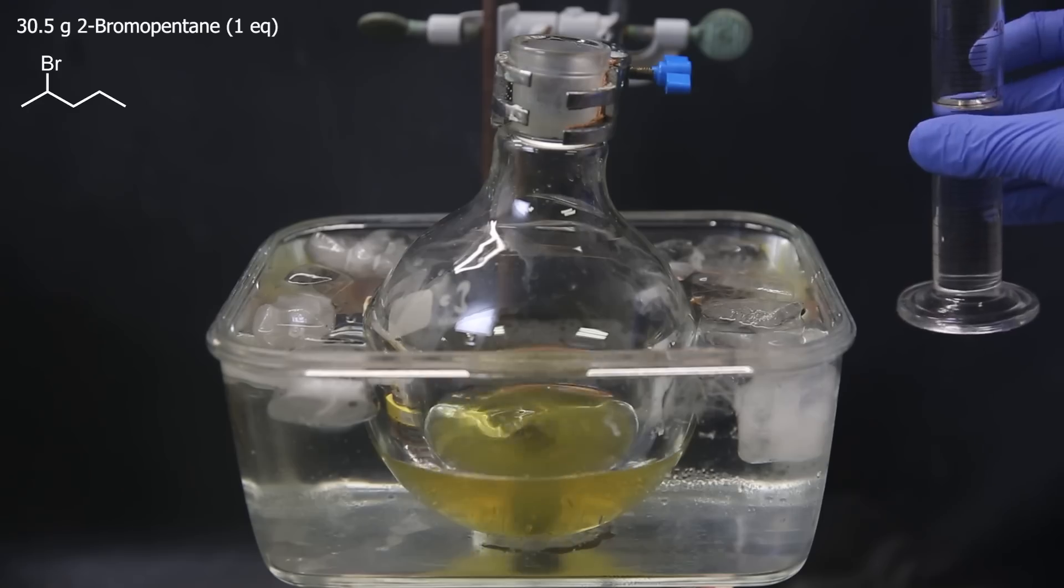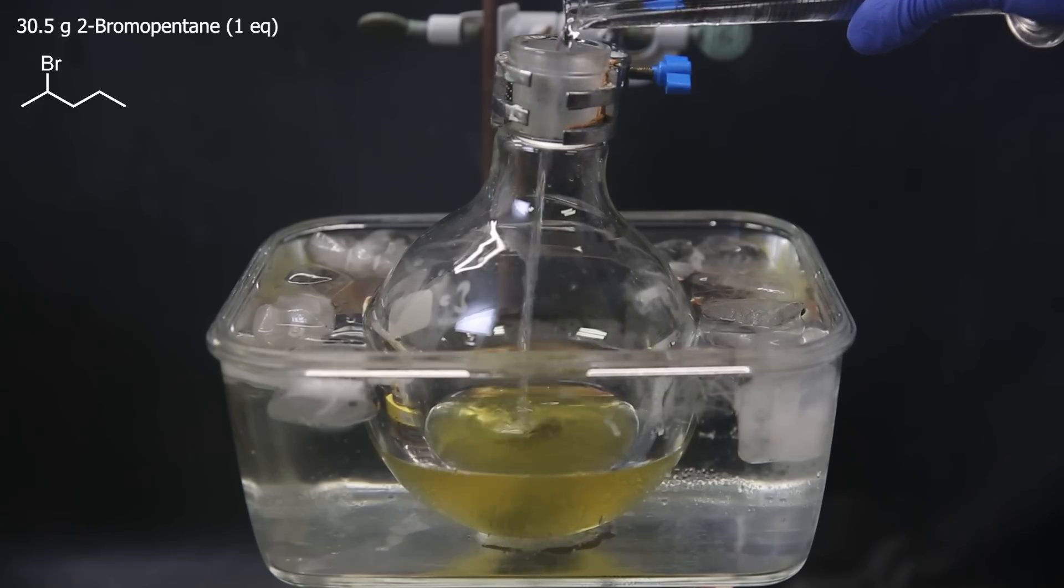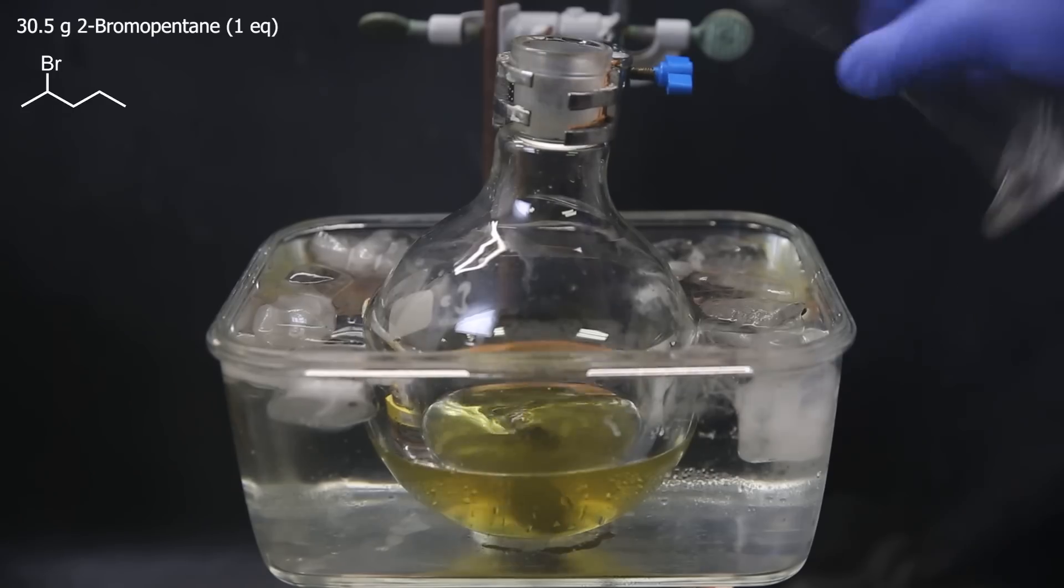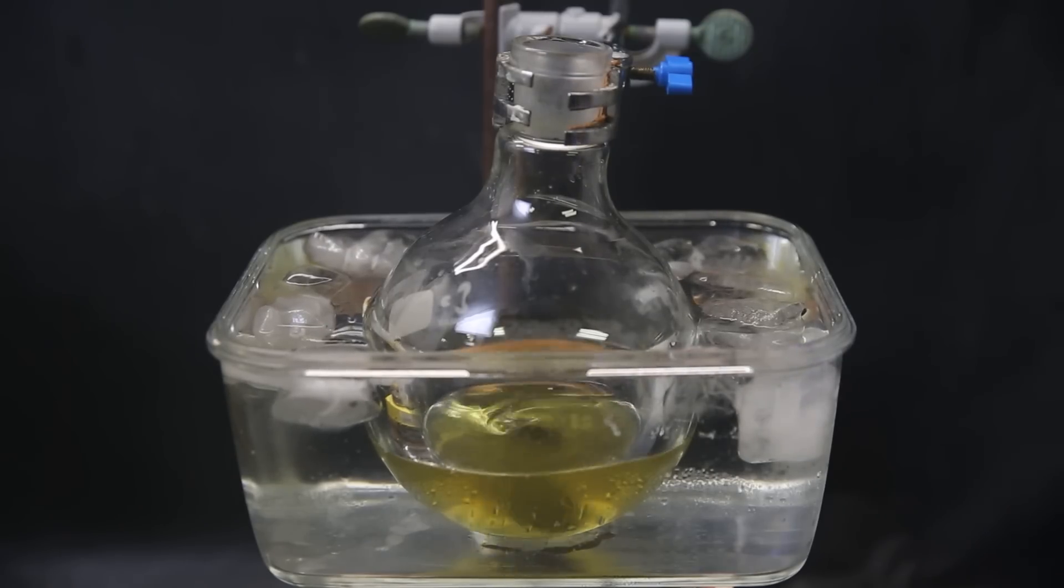As a second reactant, I add in 30.5 grams of the 2-bromopentane I made earlier. Just like before, I take it out of the ice bath and let it stir overnight at room temperature.